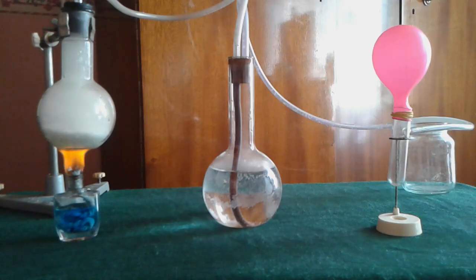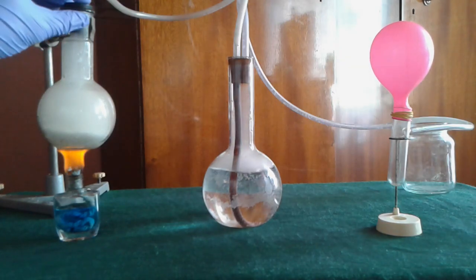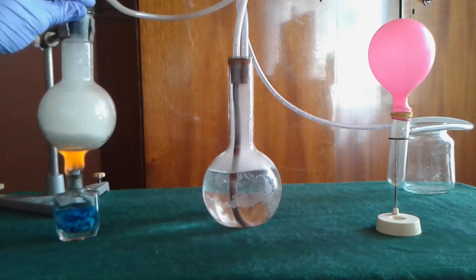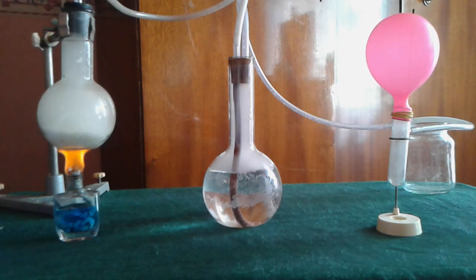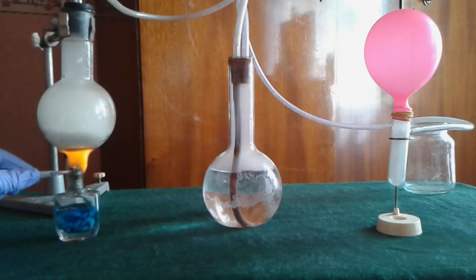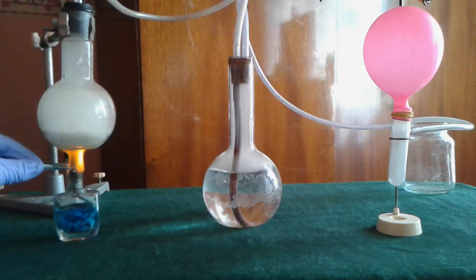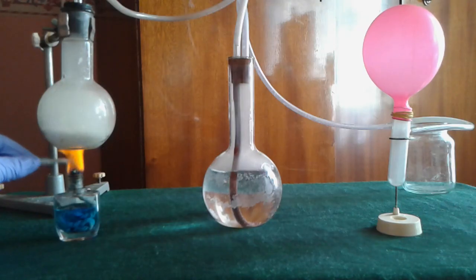As you see, the reaction has begun and it's going very well. I think we should make this flame smaller because the heat is too much.